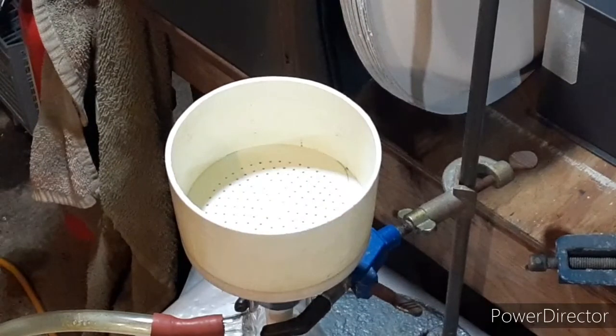I don't know if it's Buchner or Buchner — if anybody wants to correct my phonetics in the comments, please feel free. But I found it's faster to do it this way. Let me get a glass stir rod and then we'll get this filtering.